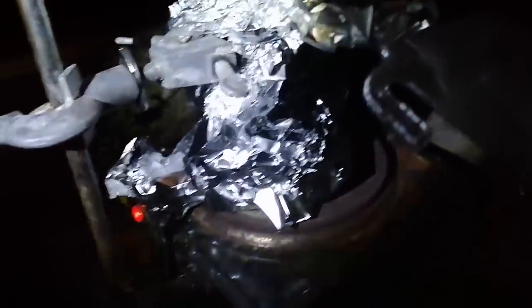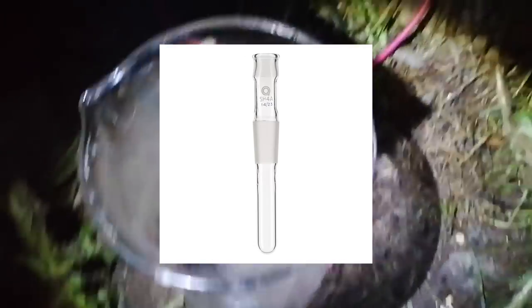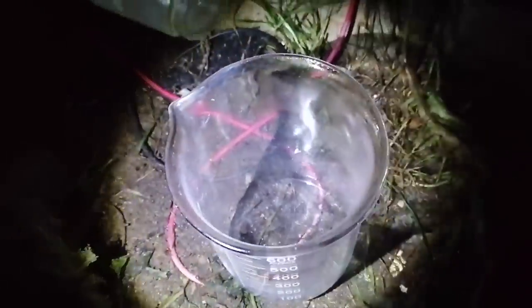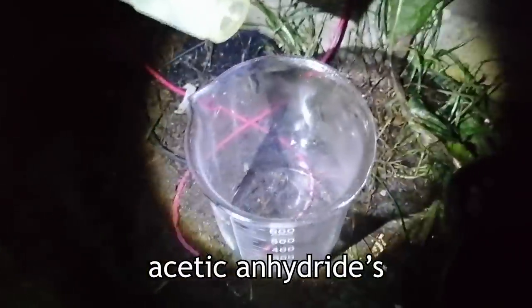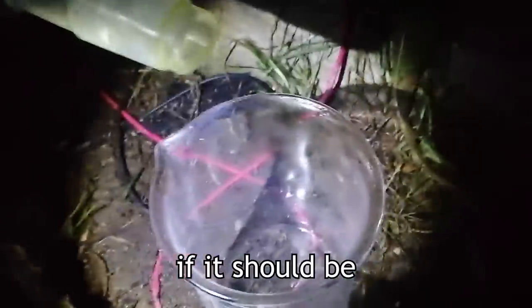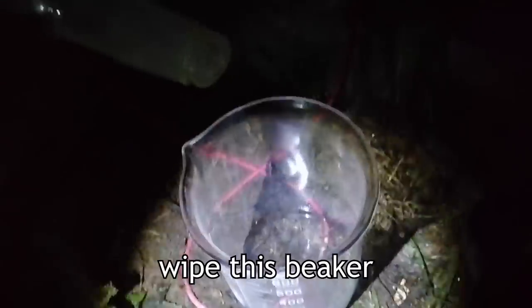Eventually I deemed the reflux to be complete and now it's time for a full distillation. Acetic anhydride boils at 140°C and whatever comes over below that temperature should be discarded. However, I don't have a thermometer head, so this is kind of like doing surgery with a blindfold — there will be terrible separation to say the least. I've discarded the first portion because it wasn't even remotely flammable. It does smell not like the sulfur chlorides, but more like acetic acid — a kind of stronger acetic acid, which is probably the acetic anhydride.